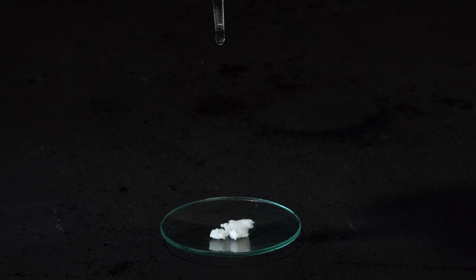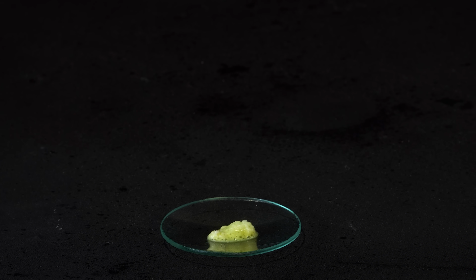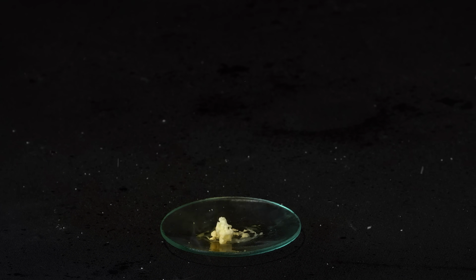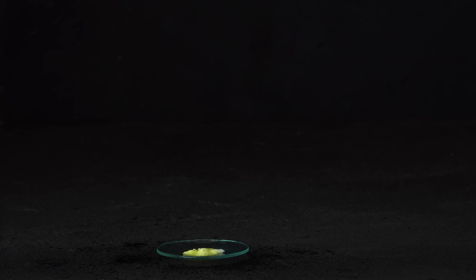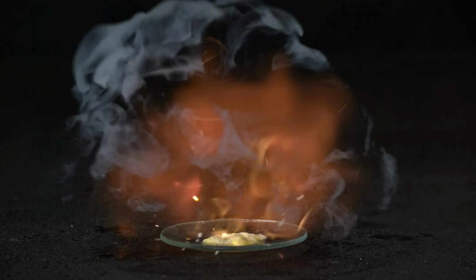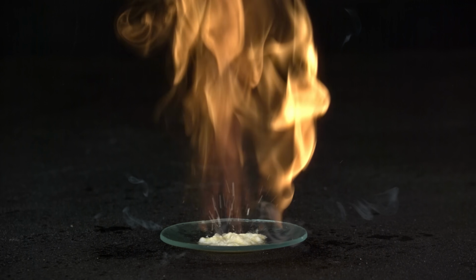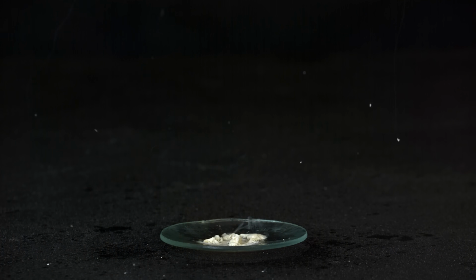Now let's check the reaction with acetone. Upon contact with acetone, the mixture turned yellow and started bubbling, definitely a bad sign. The reaction with acetone was much more intense. Now let's see how diethyl ether reacts.